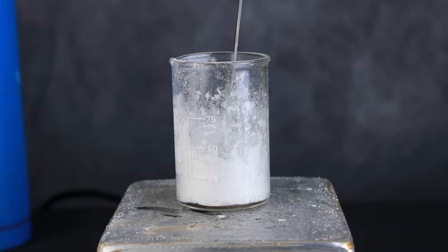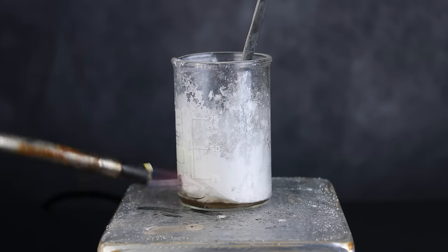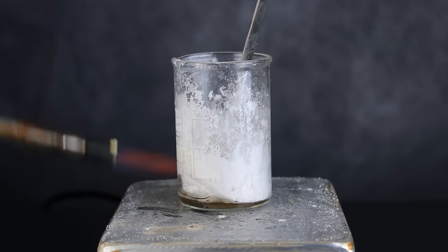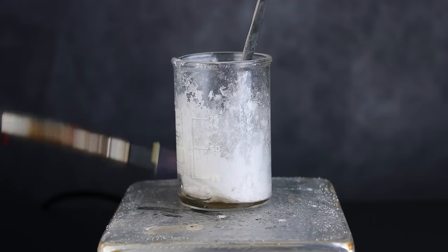To fully dry the sodium acetate, it is best to completely melt it. Fortunately, this compound has a fairly low melting point, so I was able to liquefy everything with just my torch and hot plate. Keep in mind that sodium acetate will decompose if heated too vigorously, so if you try this yourself, don't rush things too much.